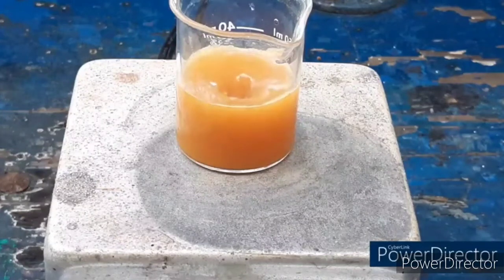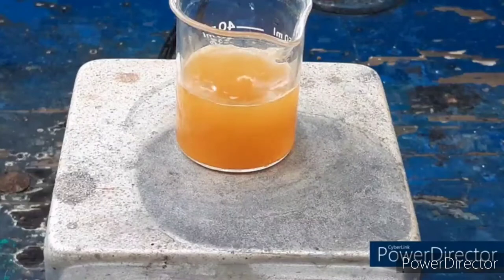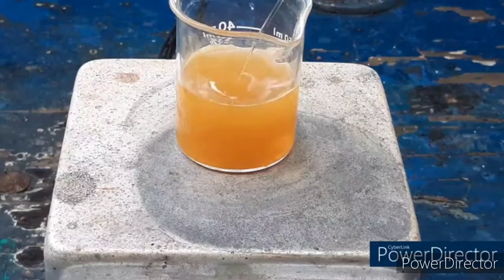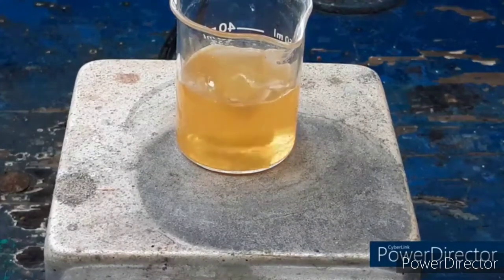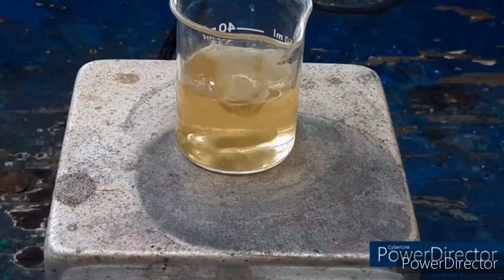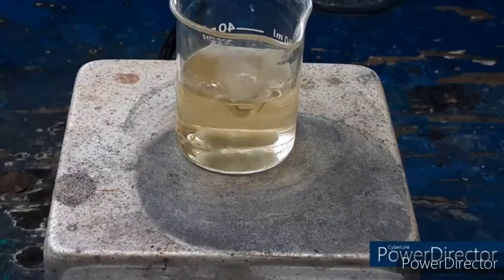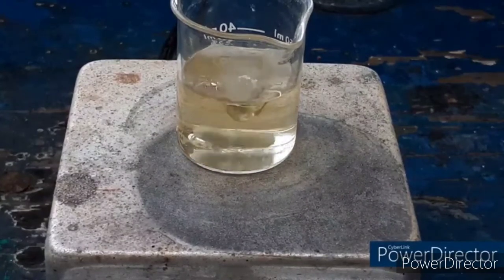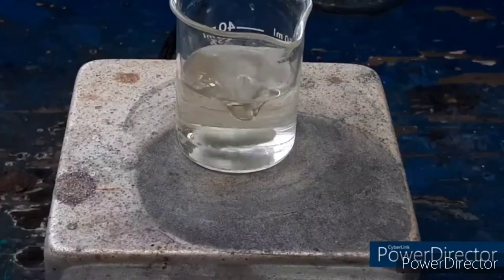Seriously? Could you please behave? I really need something to not mess up here. That's better. Why are you all kind of yellow still? That's much better — that is nice and looks like very deadly water. Very expensive deadly water.